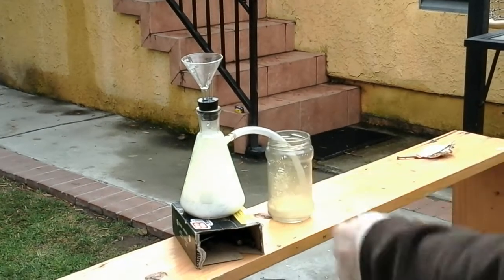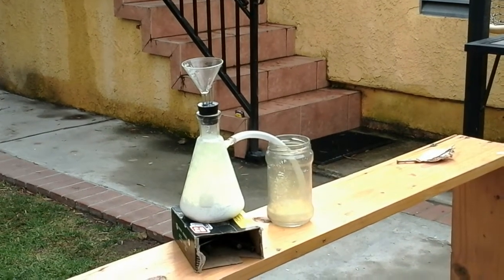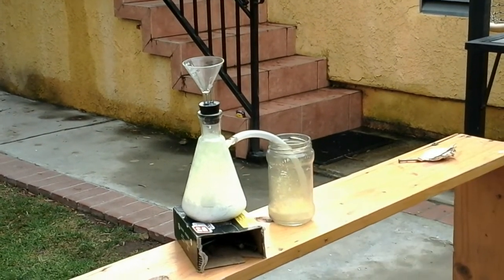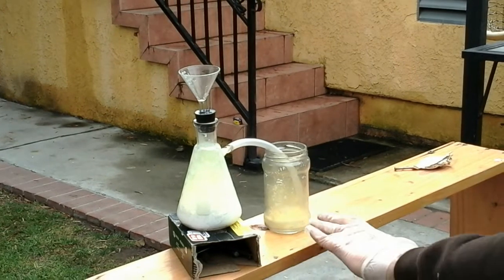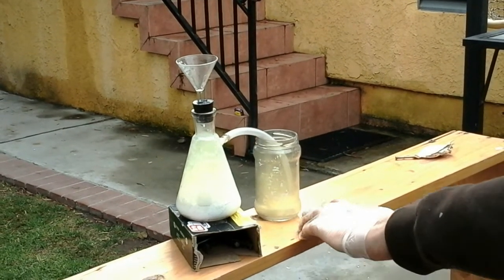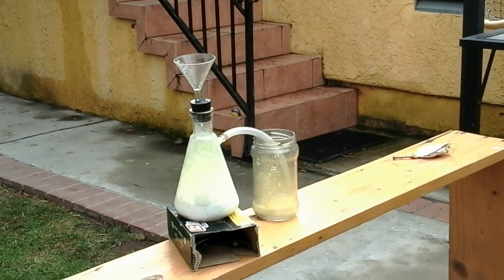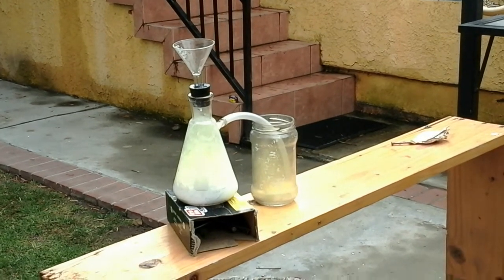As you can see, the bubbling calcium hypochlorite is reacting with the hydrochloric acid, and right here you can see this jar getting filled with green gas, as well as the Erlenmeyer flask.